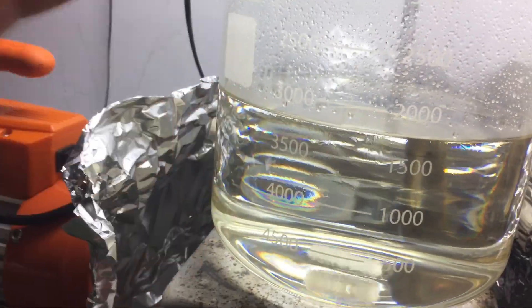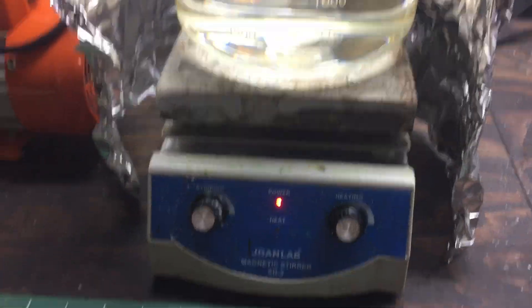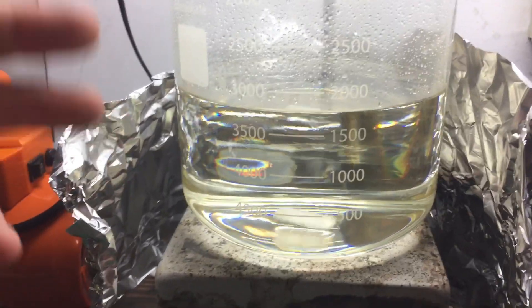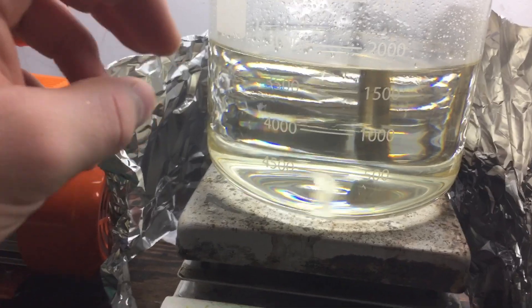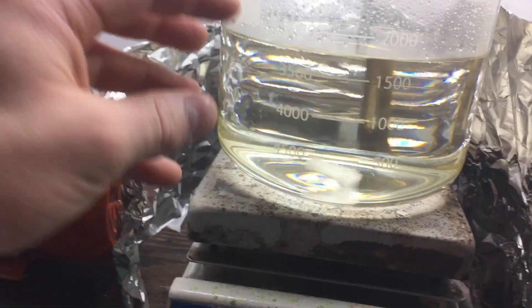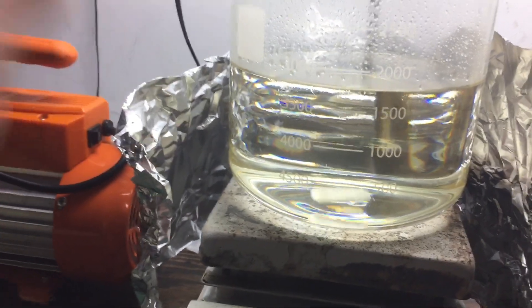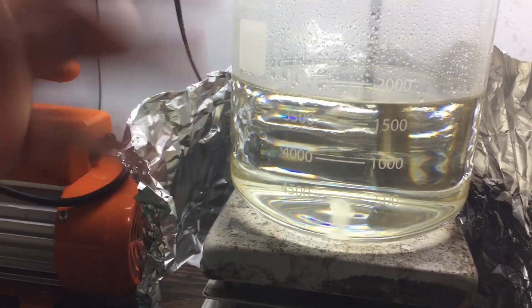You can even tell by looking at the side — there's a bit of a whitish opaqueness to the droplets, showing there's salt content even in the spray. This was beginning to sputter a little because it was so saturated. Now that the heat is turned off, the solubility of the ammonium nitrate in solution is going to greatly decrease, and our ammonium nitrate crystals should crystallize out of solution. We can collect those, dry them off, then boil the remaining solution down further to make a super-saturated solution again and collect more salts.